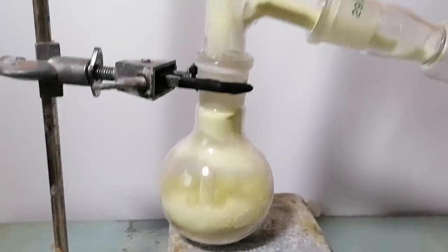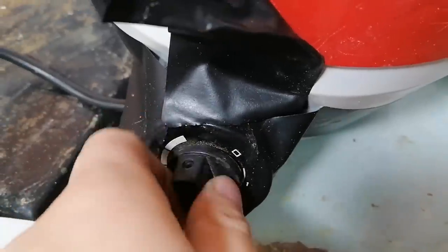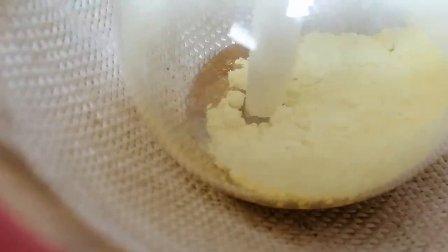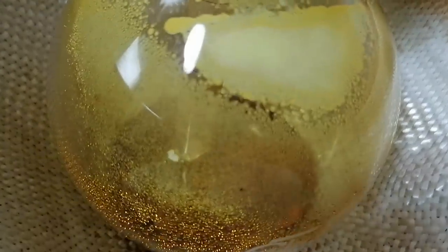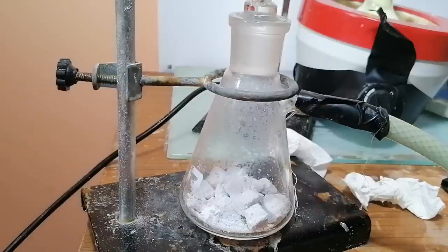Before recording I added a bunch of sulfur into a boiling flask. Here's me testing the gas trap setup. So to start, let's up the heat. The sulfur is really easy to melt because its melting point is 115°C and we need it melted because we'll be passing gas into it soon. This is going to be a fusion of the elements reaction. Eventually the sulfur melted due to the heat and now it's time to start the chlorine generation.